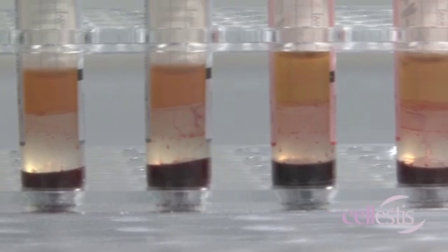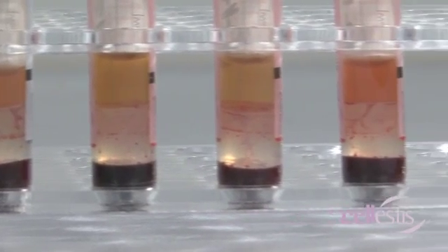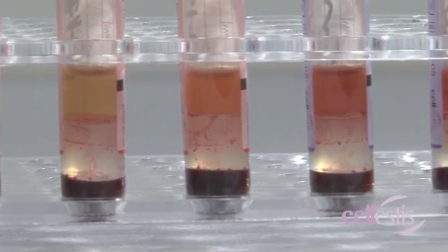The plasma may appear more red than usual. Light hemolysis does not impact the performance of the test.